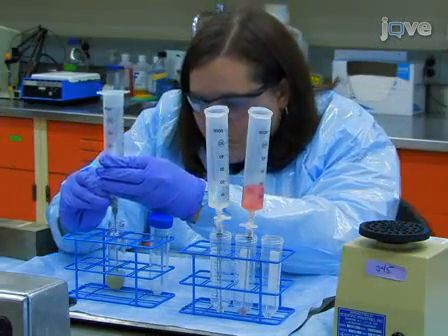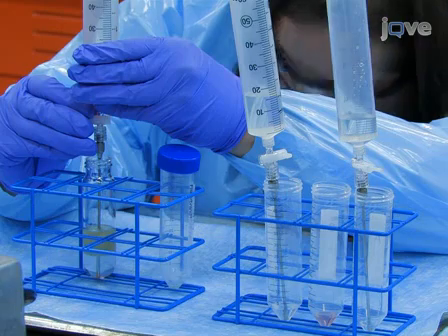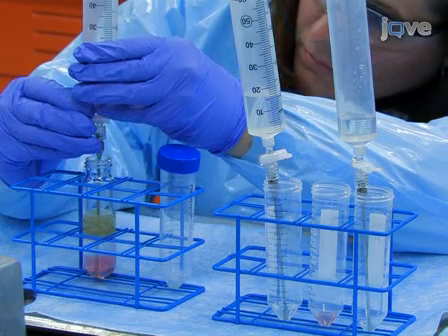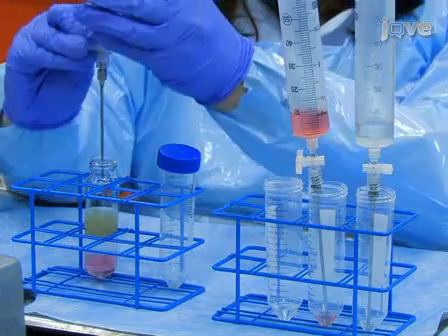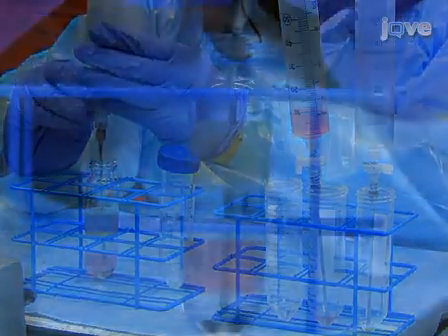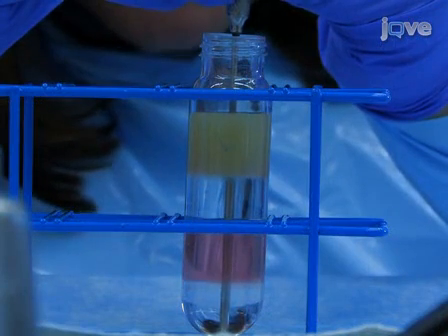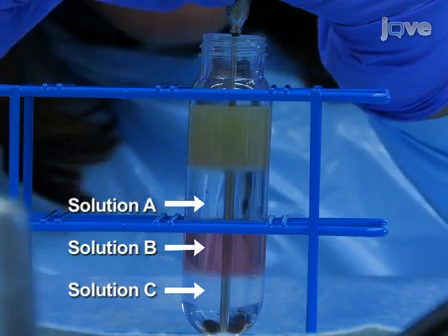8 ml of solution A, 8 ml of solution B, and 8 ml of solution C. Make sure the flow rate doesn't exceed 0.5 ml per second. It's also important to note that the phenol red in solution B helps distinguish the gradient layers.